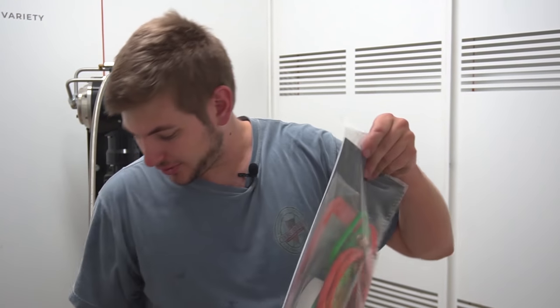Hi guys, we're here today with our One Pound Apollo. I'm going to open this up real quick.